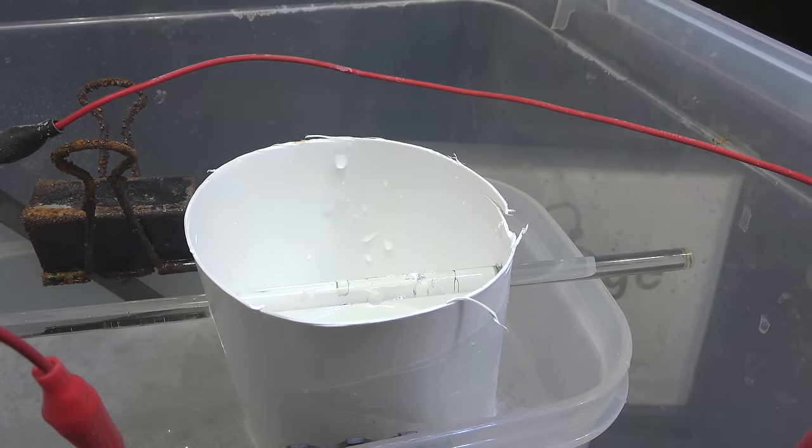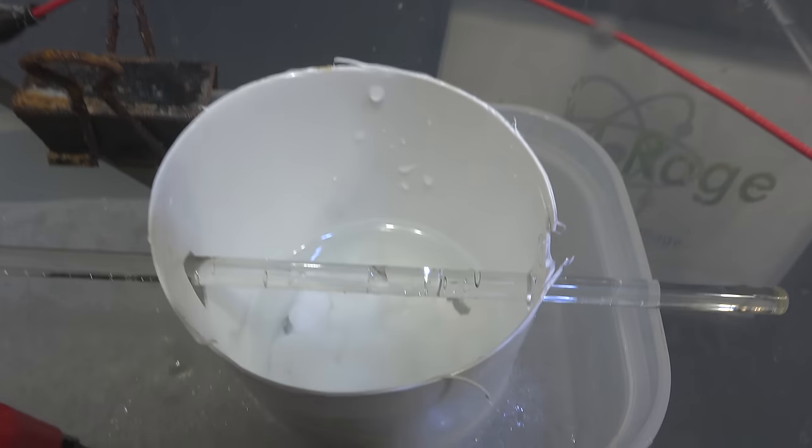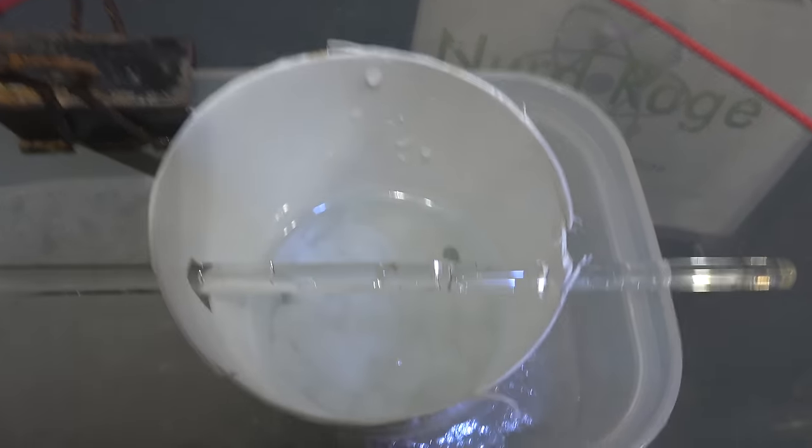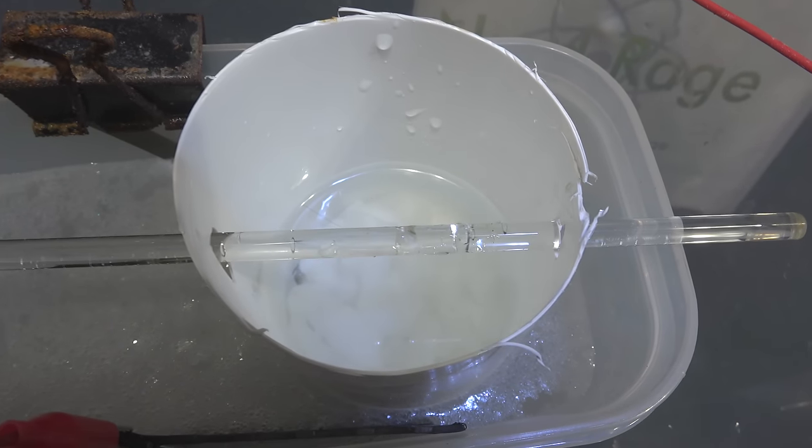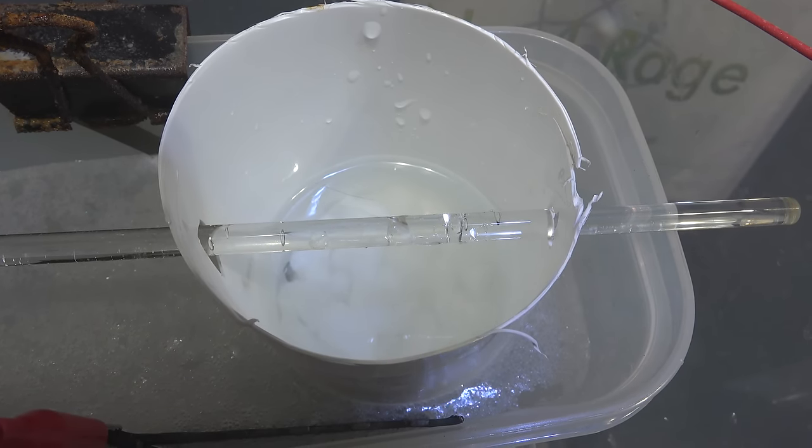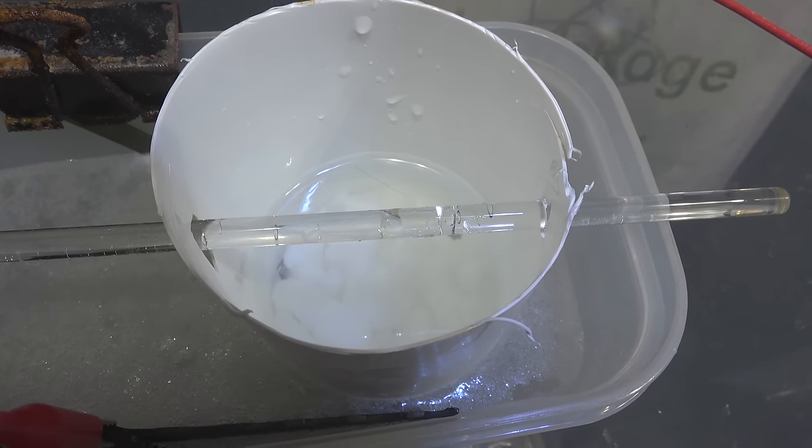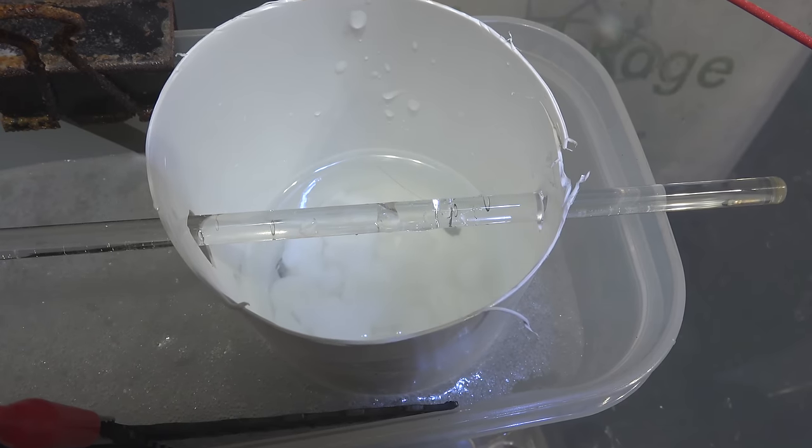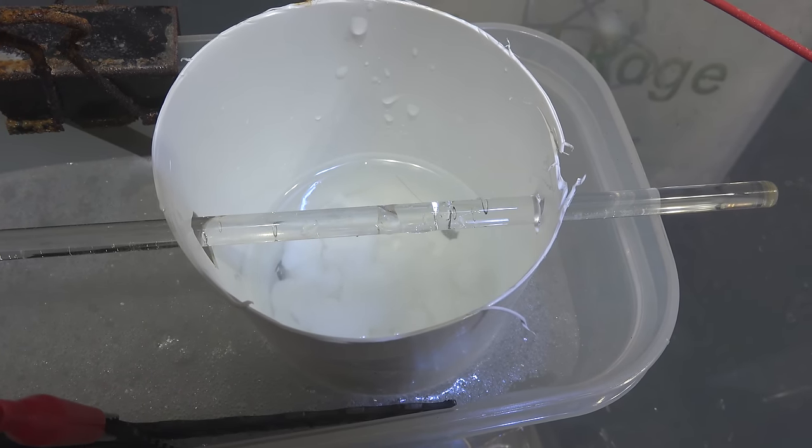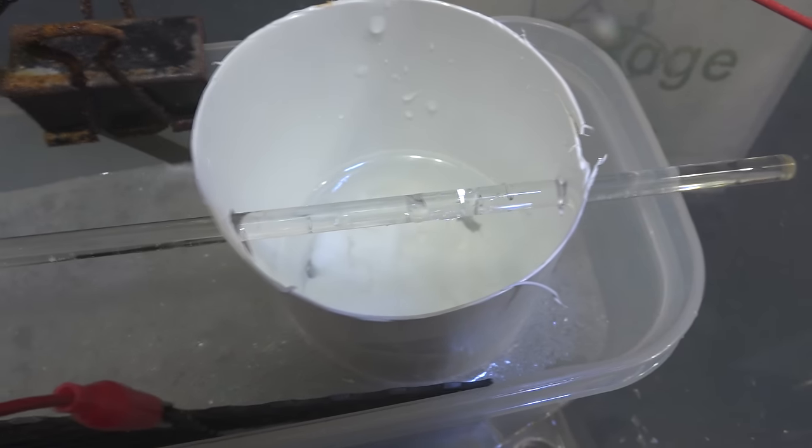A rough figure to add is 10g per 100mL of water in your cell. Although you'll need to adjust according to your particular cell conditions. I don't recommend adding it directly to the cell because when it sinks to the bottom some of the potassium chloride will be wasted if it gets trapped in the precipitating crystals of potassium chlorate. For the same reason I don't recommend leaving extra potassium chloride in the cup exceeding the saturation point. It'll precipitate in cooler parts of the cell and get wasted.